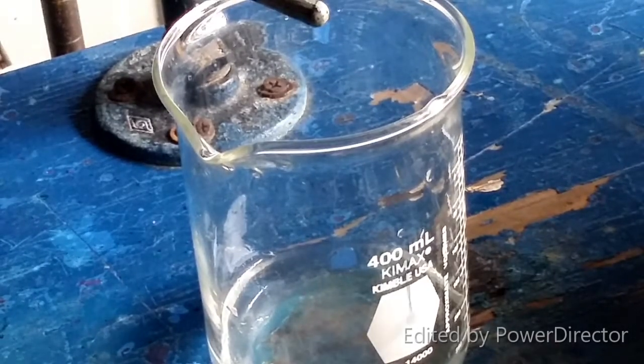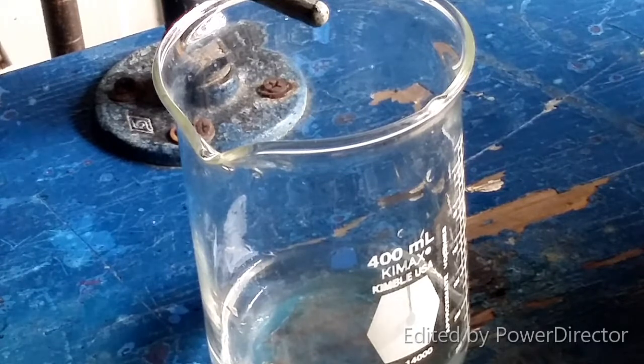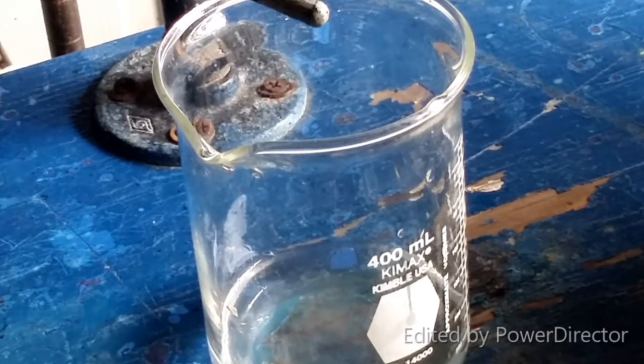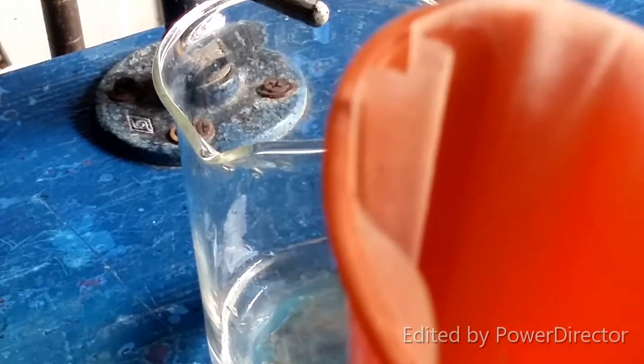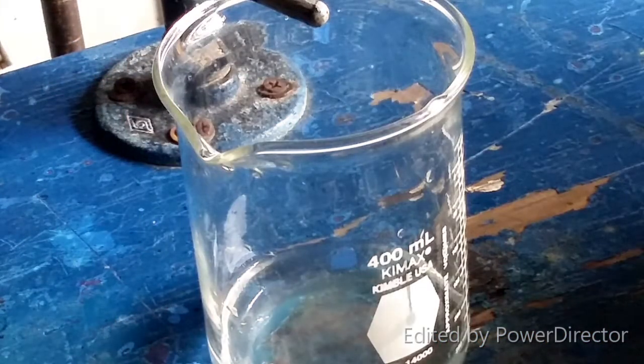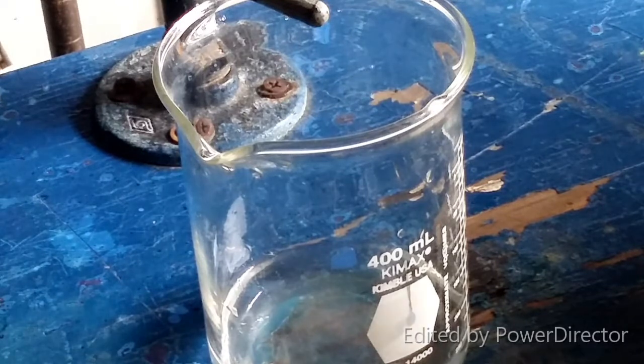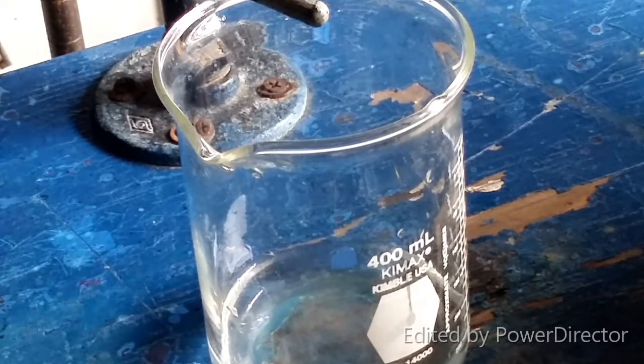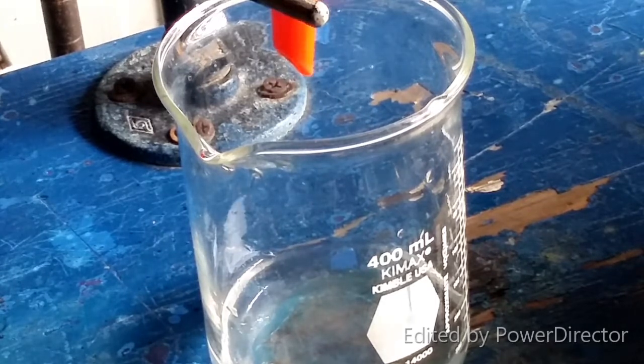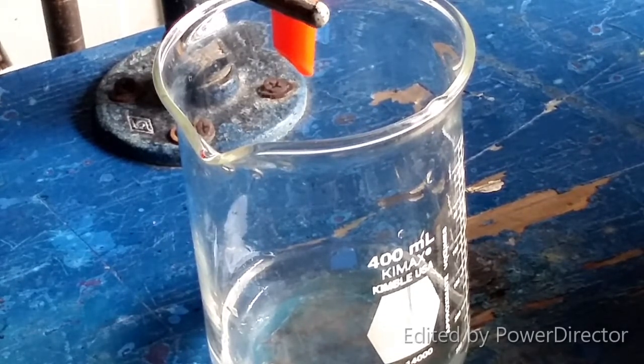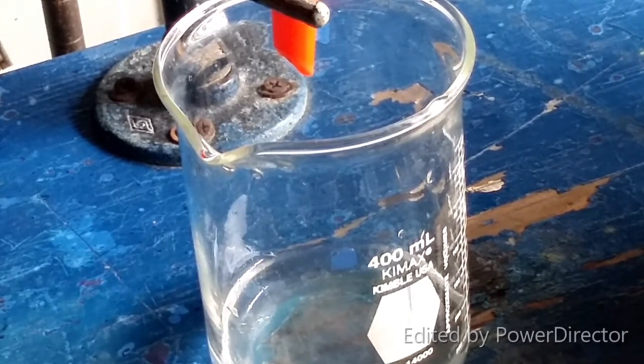The color is really not terrible, that's really not bad at all. I am going to press these dry with some paper towels and then I'm going to put them in the desiccator in the dark so they can dry out, and then I will bottle them. I will come back when that's all ready to go into the desiccator, we'll take one last look at it and then we will wrap this up.